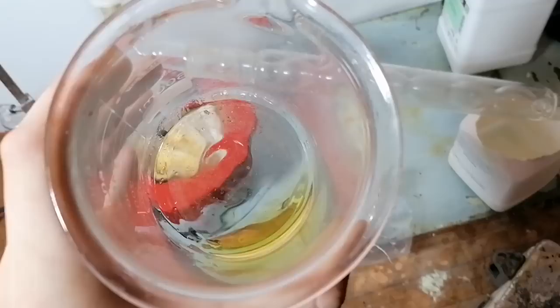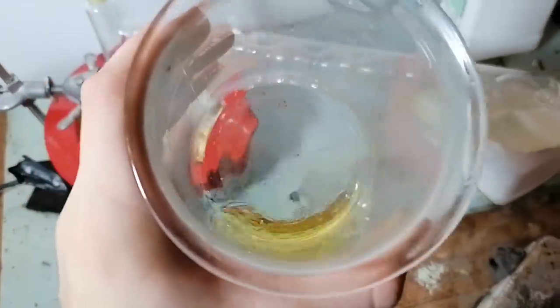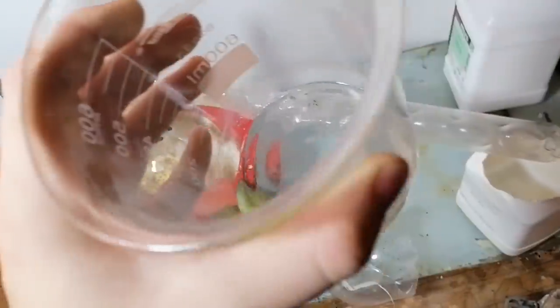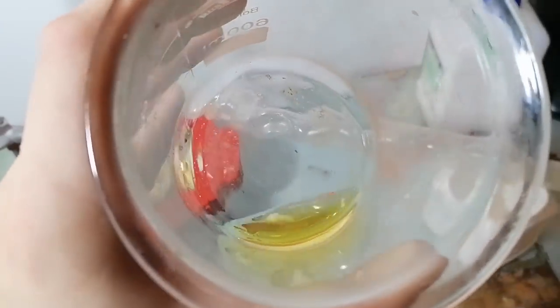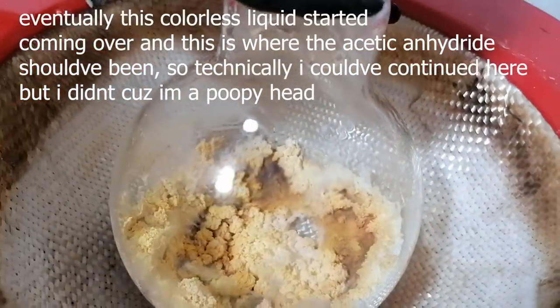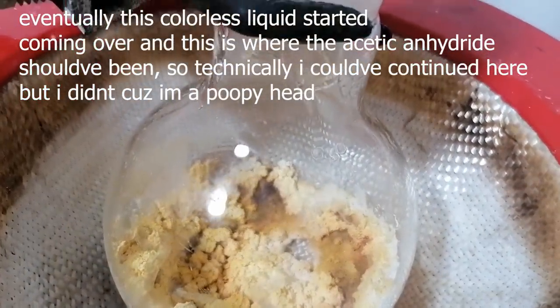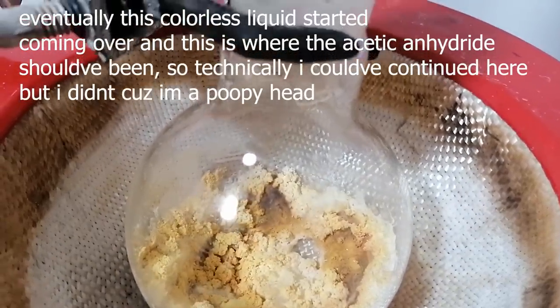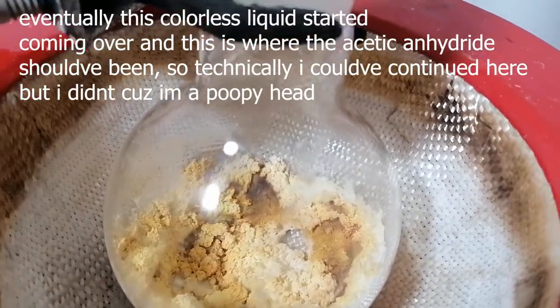The bad thing is that when everything came over, both fractions had this really strong smell of garbage and I don't think there was much acetic anhydride in the sample. Another huge problem is that my vacuum cleaner broke down and I had no ventilation. The sulfur chlorides had already stunk up the house and I couldn't repeat it for obvious reasons of not getting disowned by my family. So I had to take my lab outside and do the experiment at night when there were no neighbors.